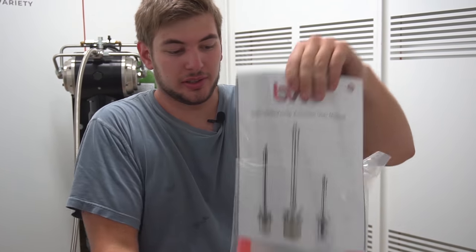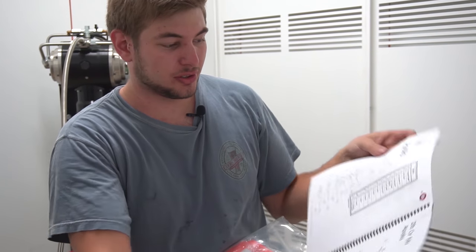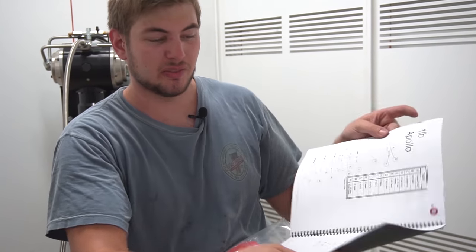You can see that there is a user manual included. This manual has tons of information on how to run the extractor properly, complete with parts lists and flow diagrams, everything you need to know.